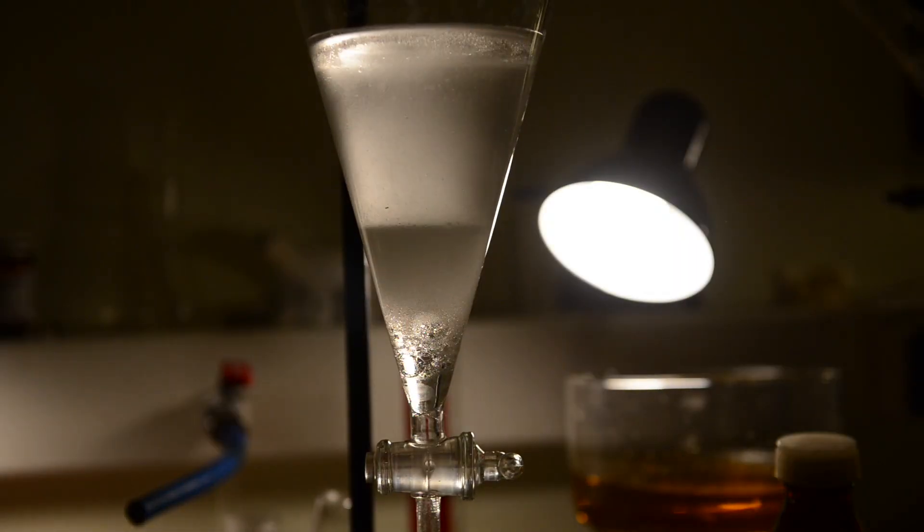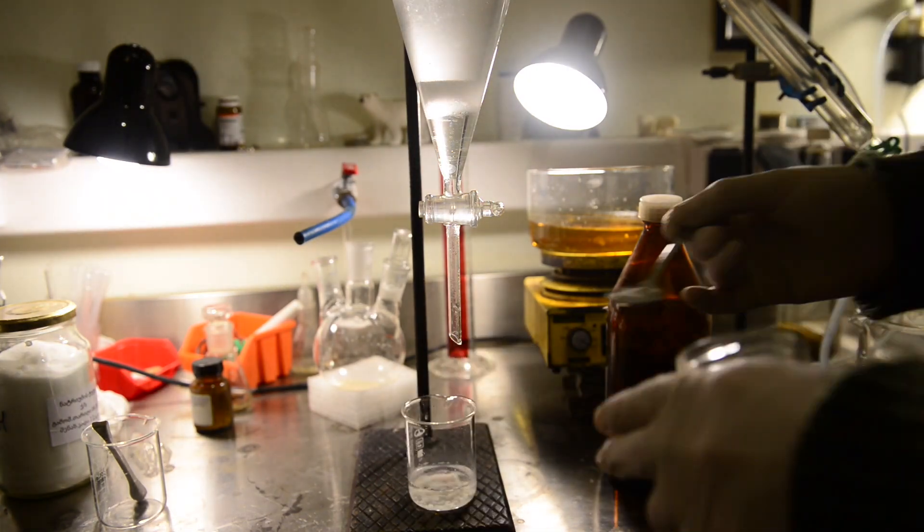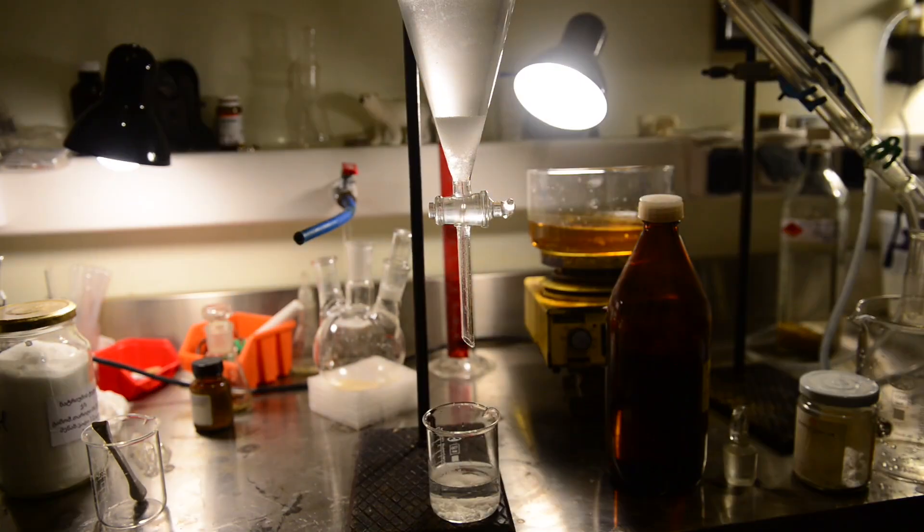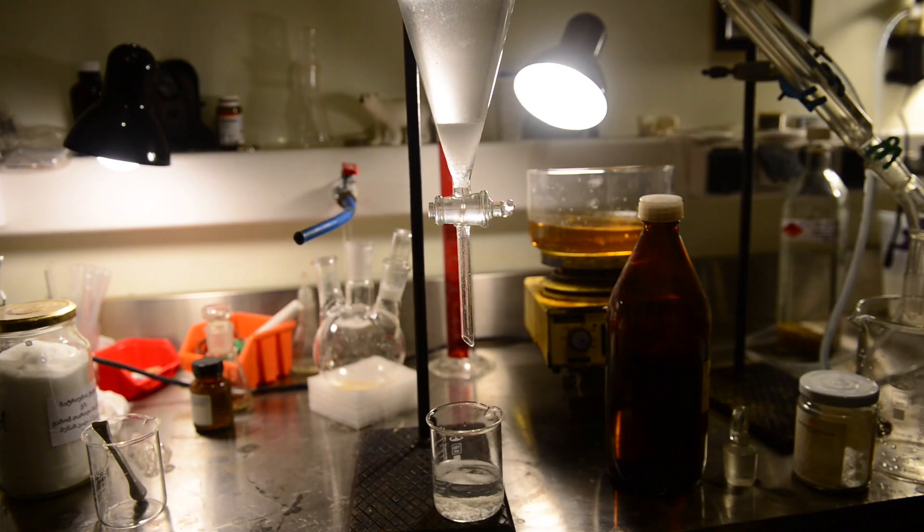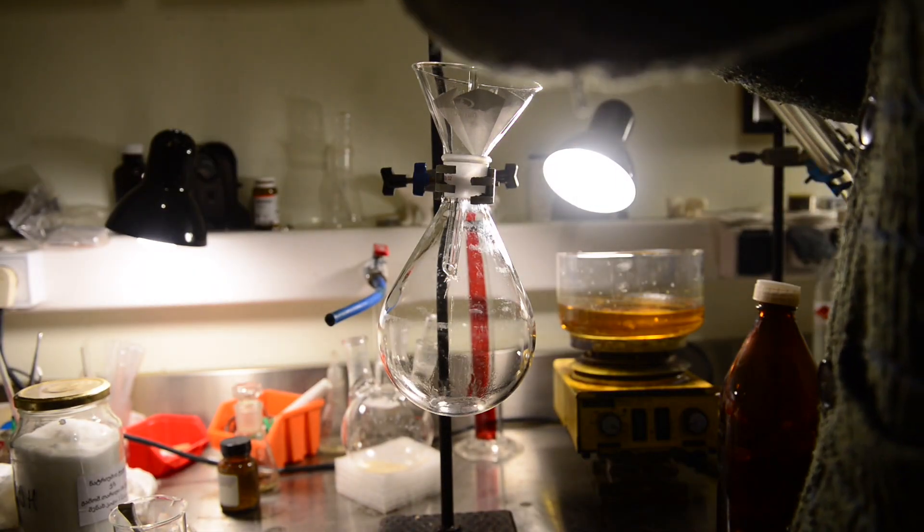Probably less side products were formed this time. After separation, we extract the water layer with 30 ml of DCM twice. We dry the combined extracts using anhydrous magnesium sulfate.